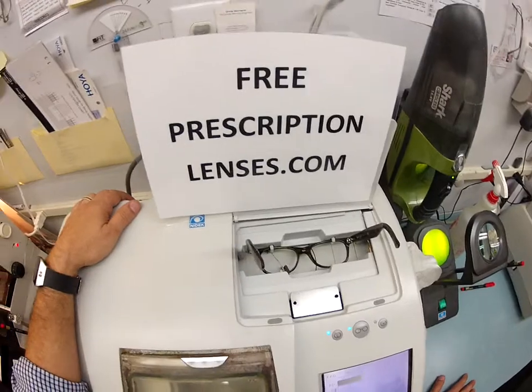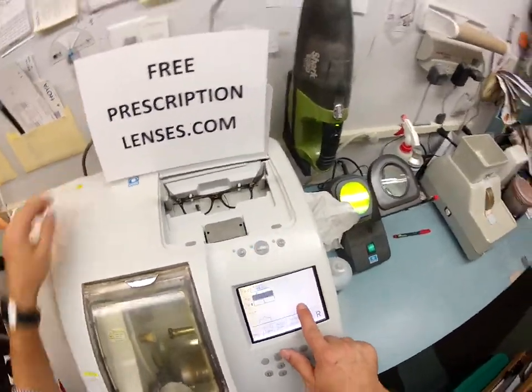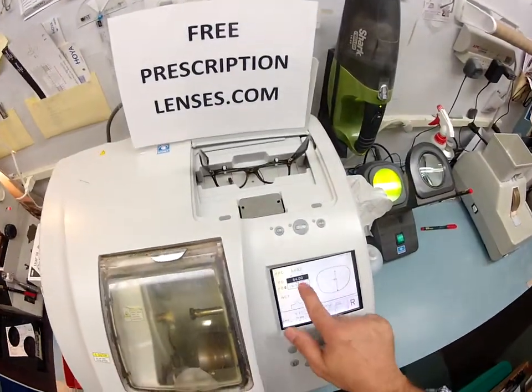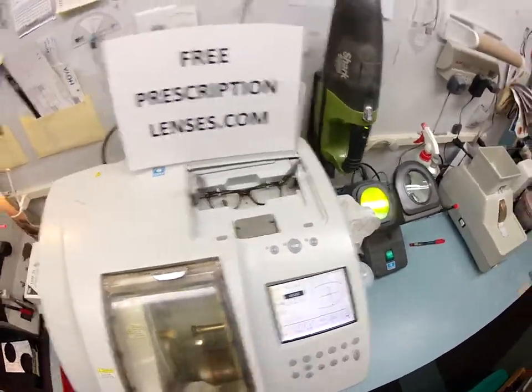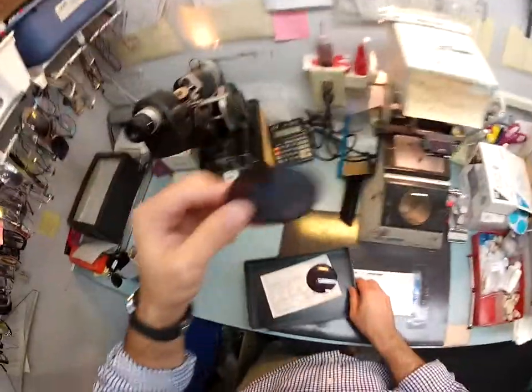I'm going to pull up the shape of your lenses — and it is done. Let's pull up that shape. Your PD is 64, I'll type that in. This is a polycarbonate lens being cut for a zyl frame, which is an old school name for plastic. So this is your right lens — at least they've got it marked right.